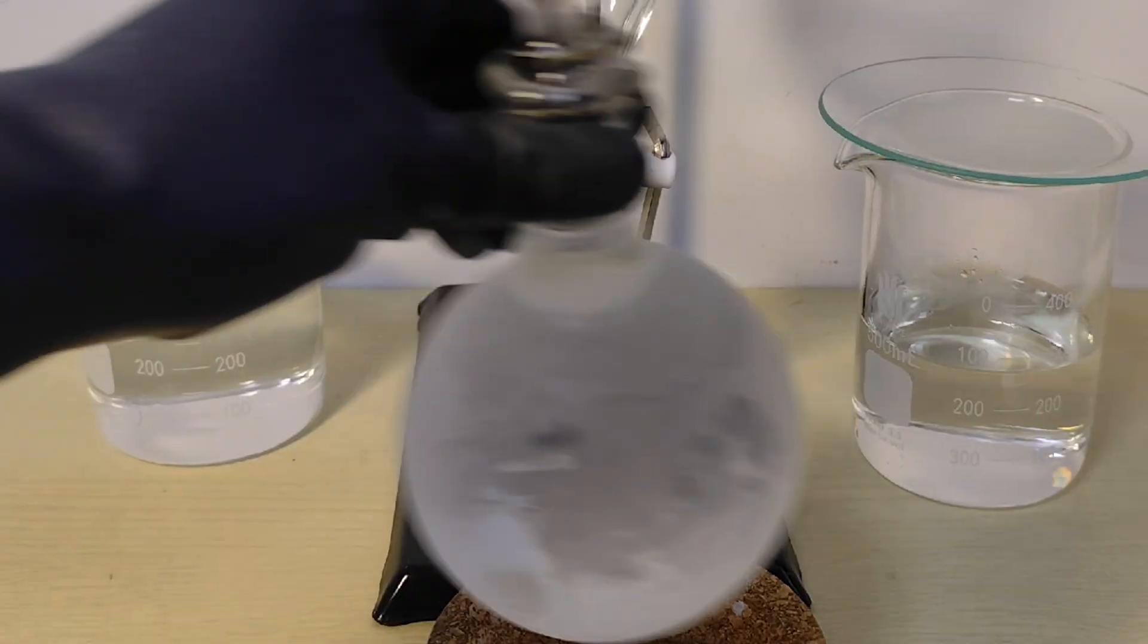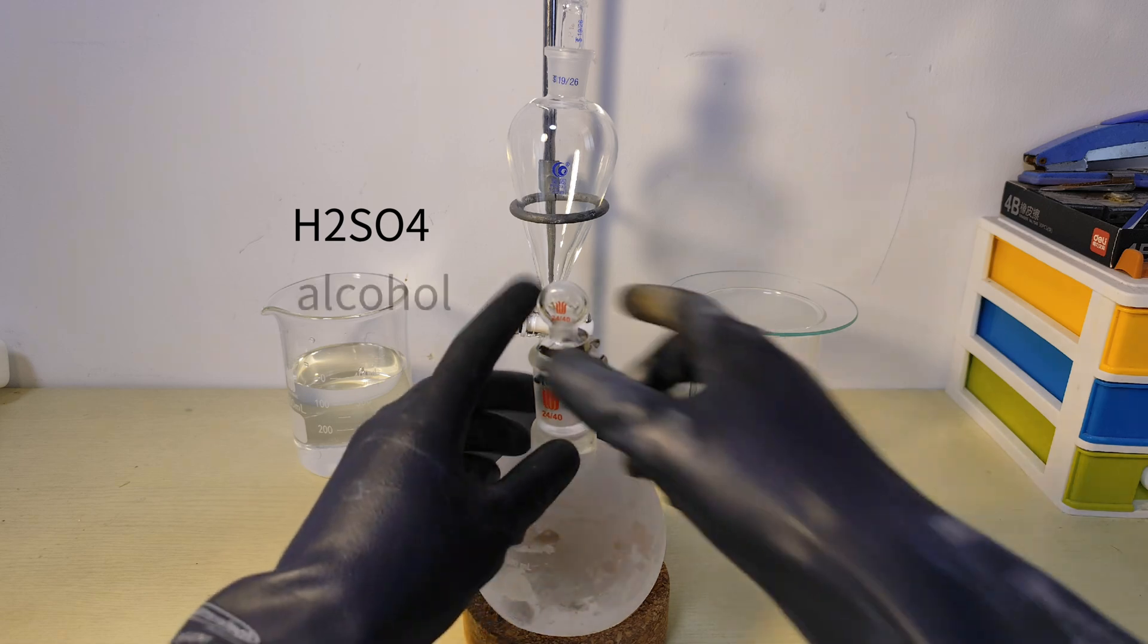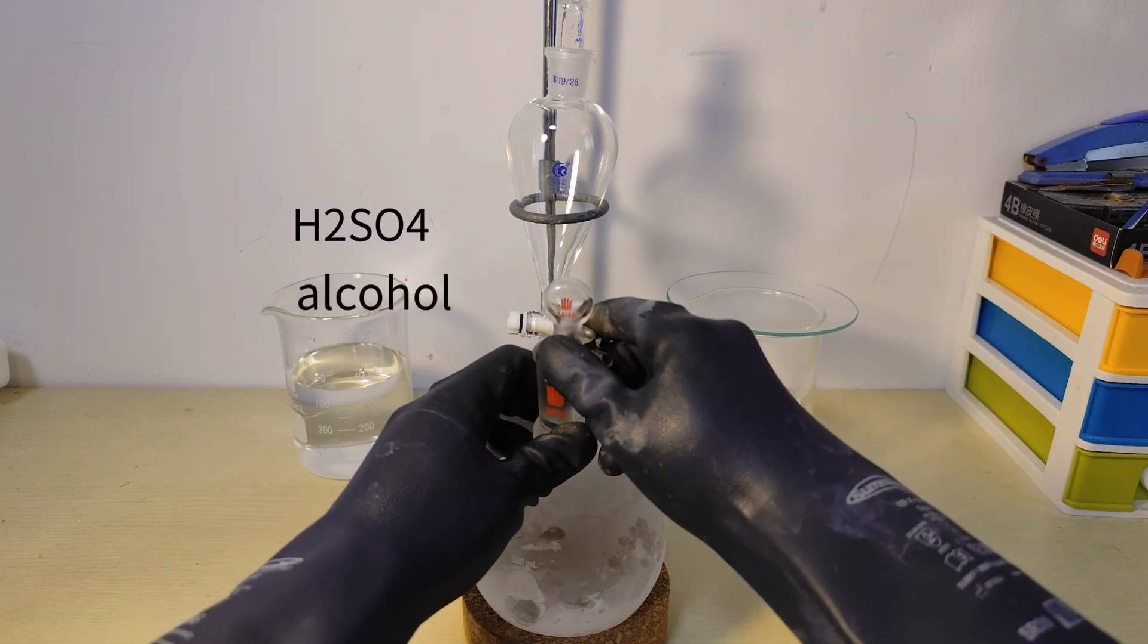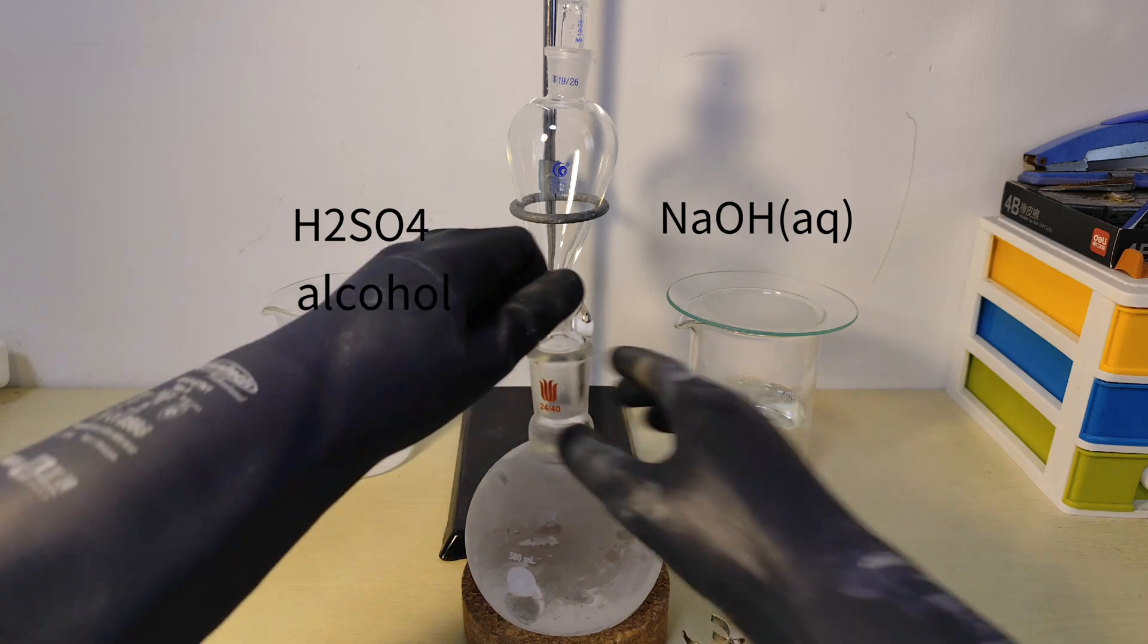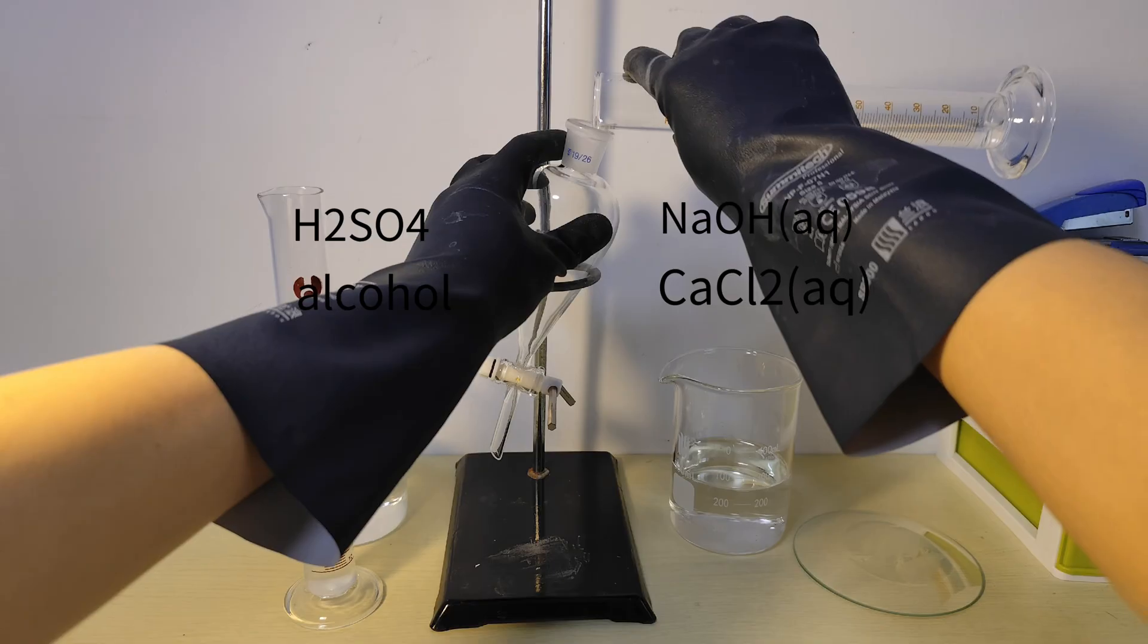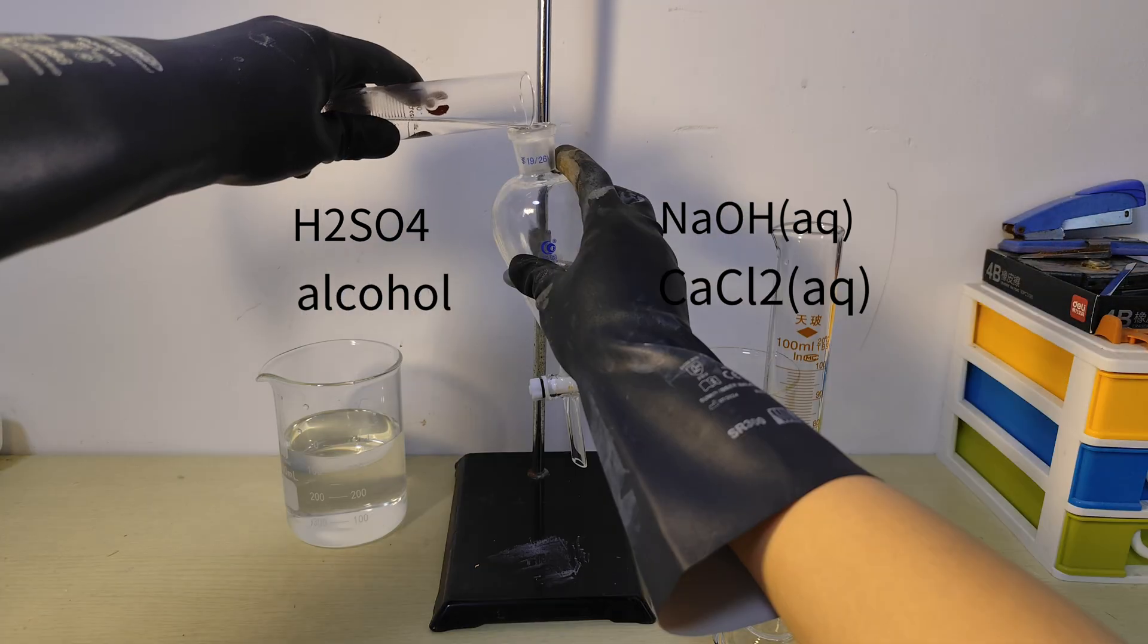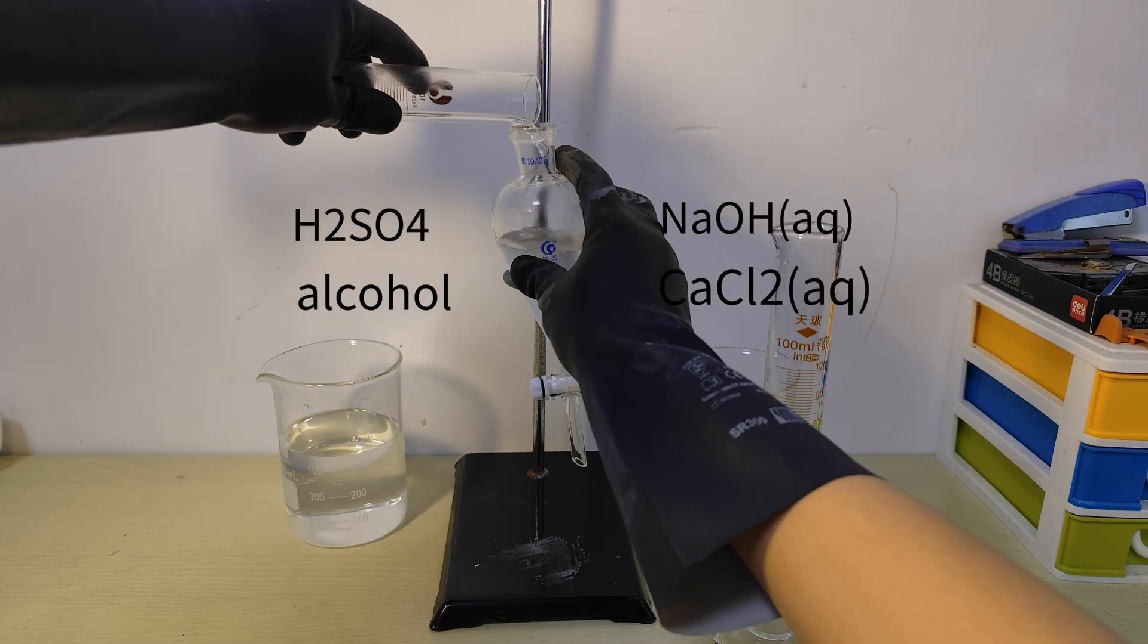The next day, what I have is some raw diethyl. The impurity in it is actually some acid and alcohol, so I just wash it with some sodium hydroxide solution and calcium chloride solution. The former one could react with the acid and produce water, while the second one can react with the alcohol and absorb the alcohol.